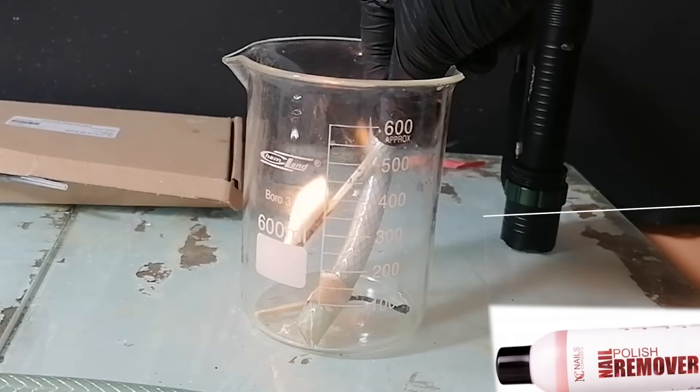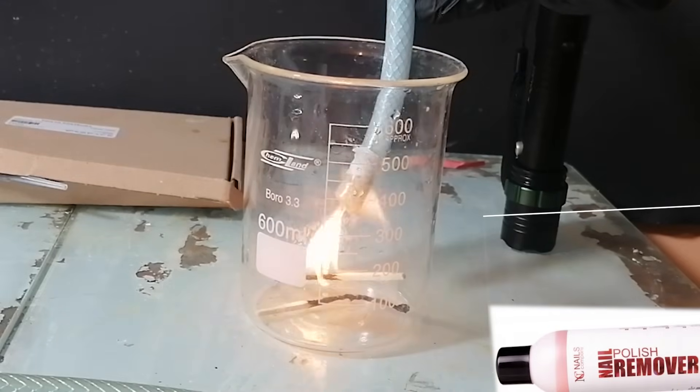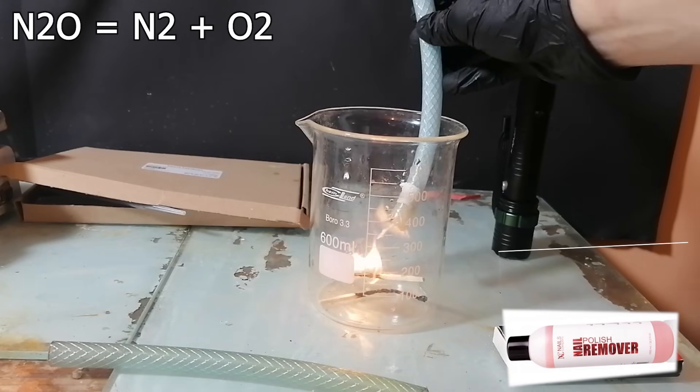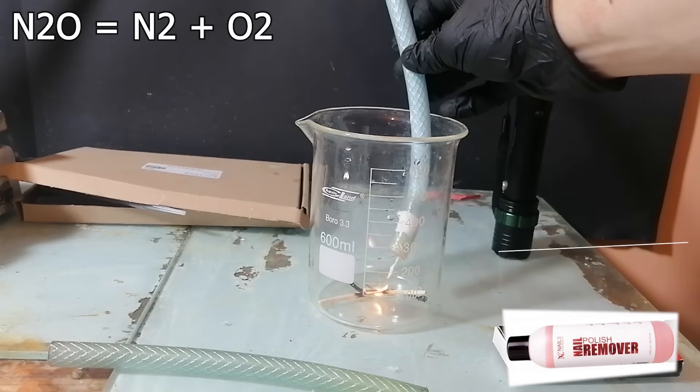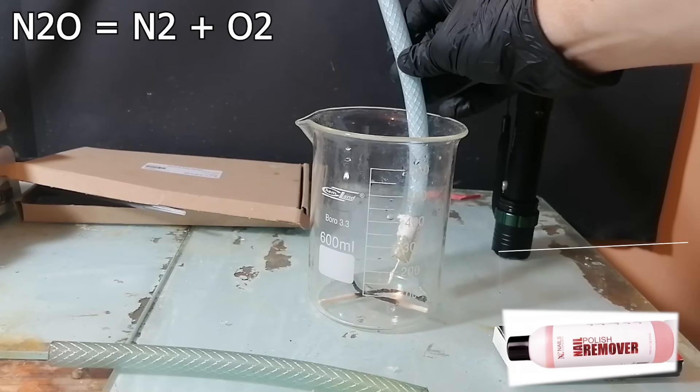This proves that there's an oxidizer, and unless the mainframe of the matrix glitched, it was probably the nitrous oxide doing its thing. Basically what's happening here is the heat of the match is destroying the nitrous oxide molecule into nitrogen and oxygen.